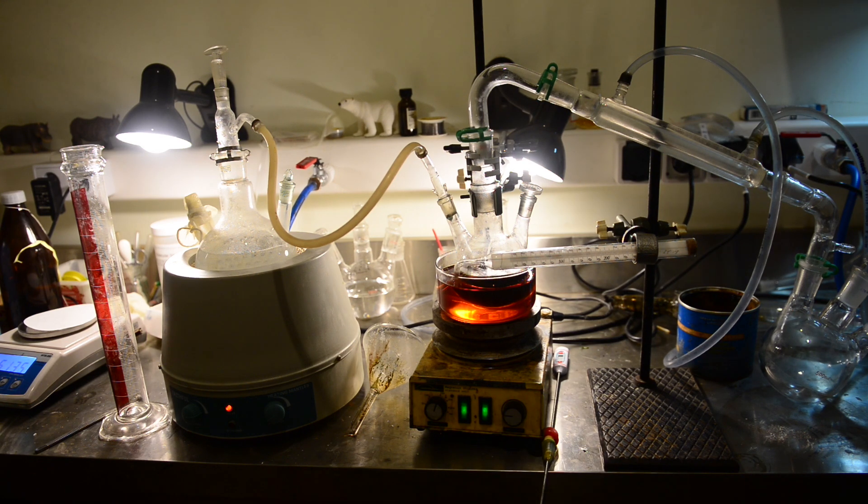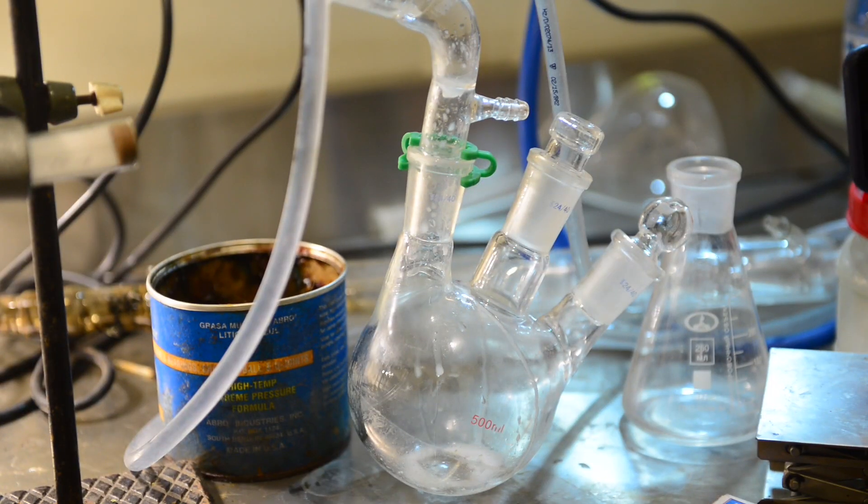The rubber tube from the steam generator is connected to the special glass tube with the ground joint and long nose going down to the reaction mass. Steam is passing through the heated reaction mixture and small droplets of the 1,2-methylenedioxybenzene are distilled along with water. As soon as a powerful stream of steam is passed through the reaction mixture, a milky oily distillate has started to collect in the receiving flask.